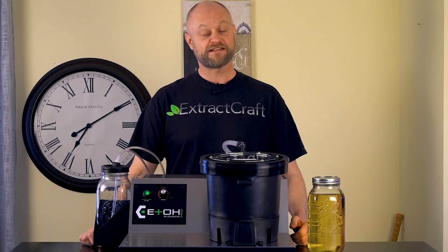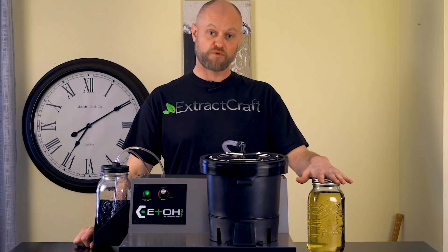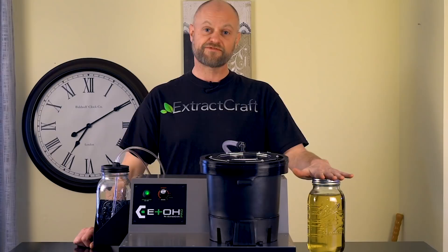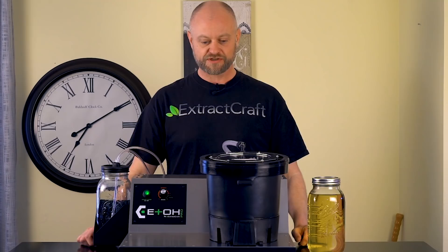Hi everybody, and welcome back to another educational video from ExtractCraft. Today we are here to show you how to properly run our new 4 liter capacity EtOH Pro. We're going to run some hemp — specifically a hemp wash. We took some organic hemp that was locally grown here in Longmont, Colorado, washed it for about 5 minutes, did a nice soak, and a filtration through a Buchner Funnel. We're going to run this today and show you how to create a full extract hemp oil.